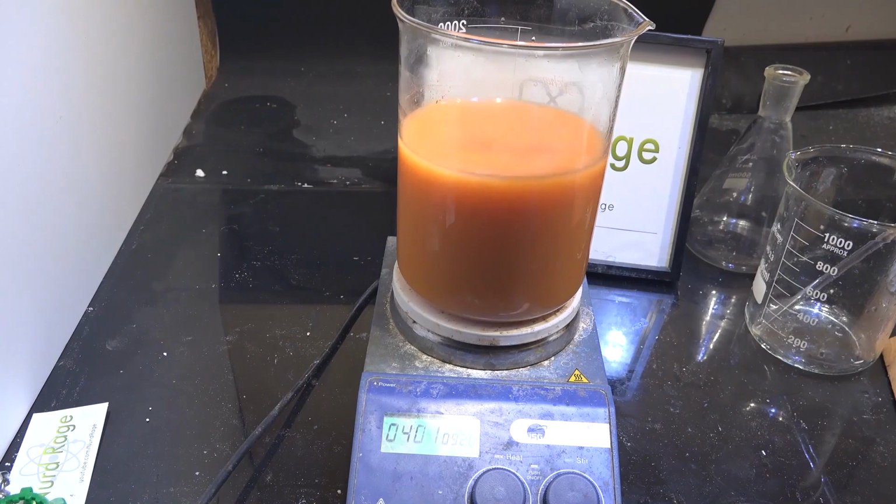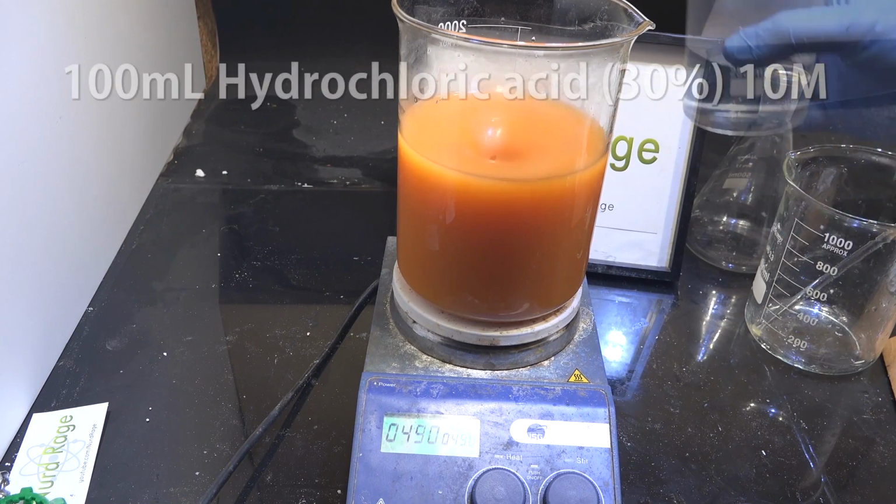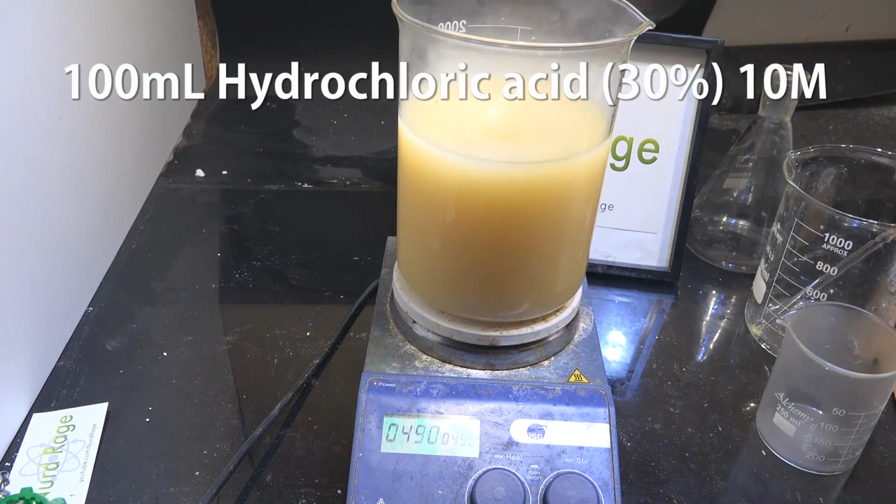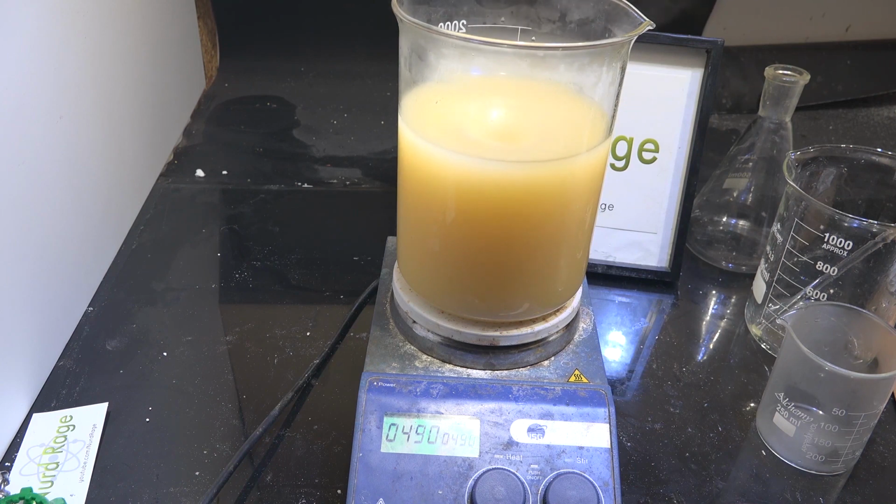Once it's all in the beaker along with 1 liter of water, stir it for 10 minutes or so to thoroughly suspend the chemicals. Now add in 100 milliliters of 30% or 10 molar hydrochloric acid and keep stirring for another 10 minutes. Turn off the stirring and let it settle.